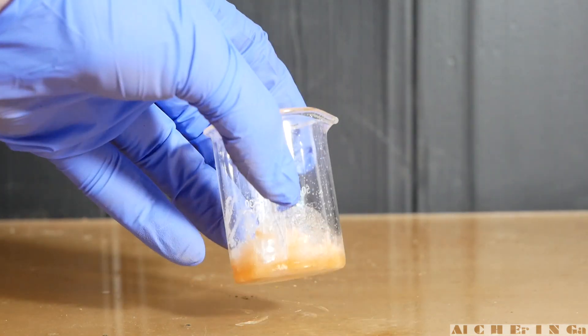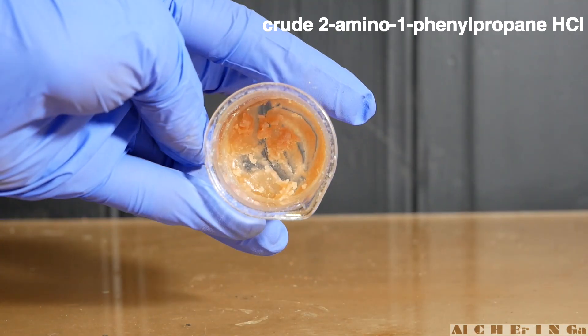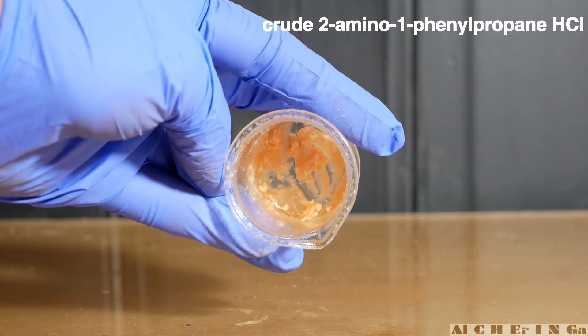As we can see, there is a light orange-pink crystalline material in the beaker. This should be our crude 2-amino-1-phenyl-propane hydrochloride.